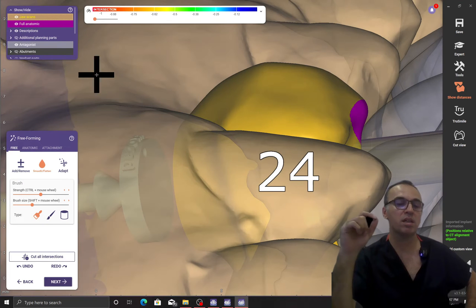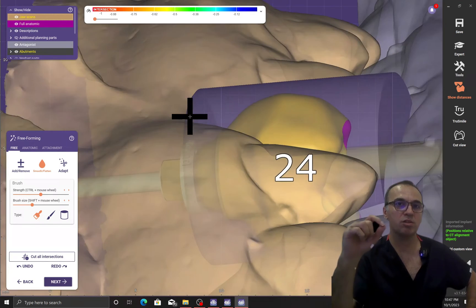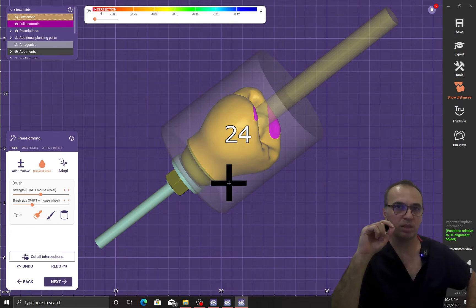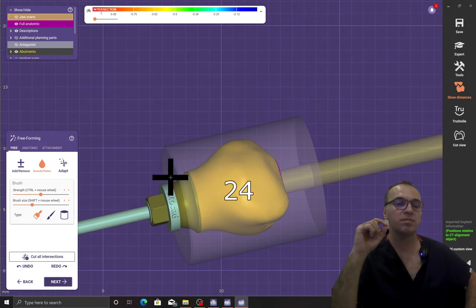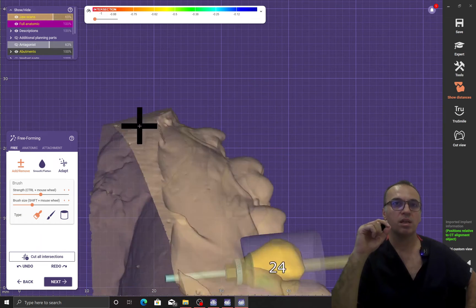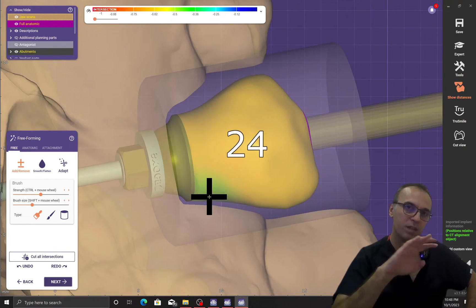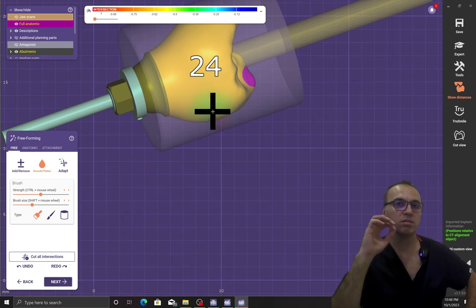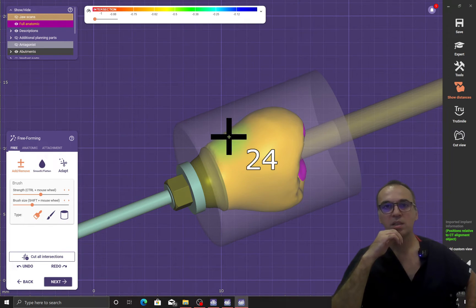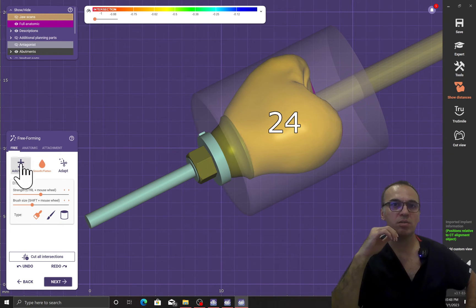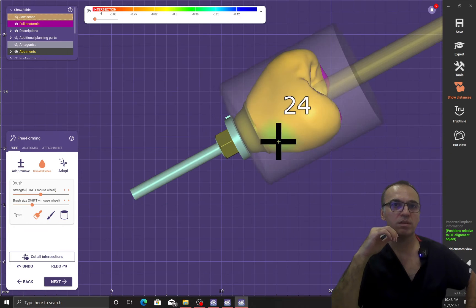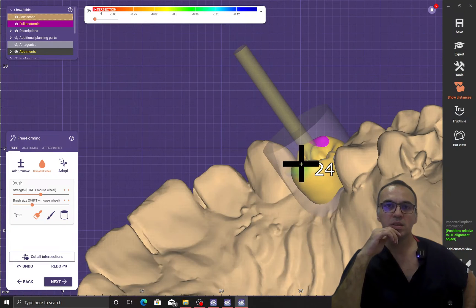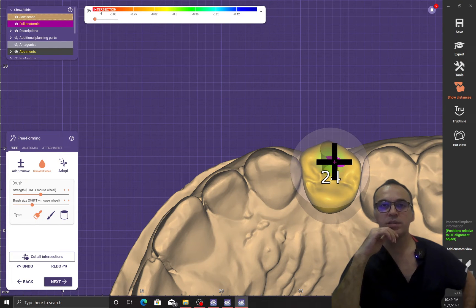The next thing that is crucial for us is: whenever you are going to design a crown for immediate loading, it should be tissue-friendly and it's so important to have a flawless transition between abutment, crown, and emergence profile — this is so, so important in these cases. As you can see, I do my best to take care of every piece, and here I'm going to reform the crown.